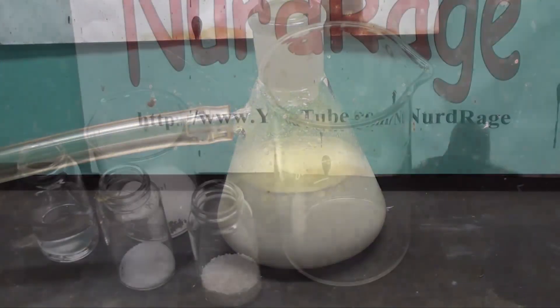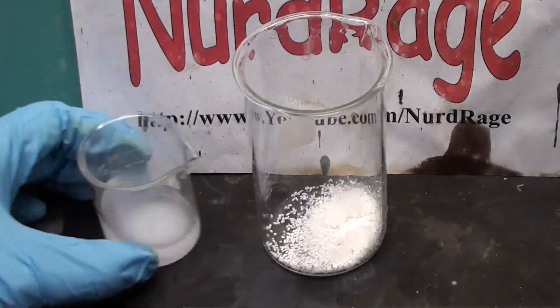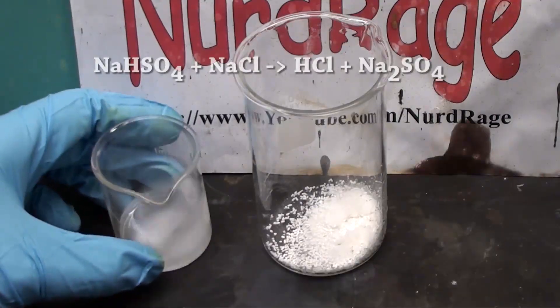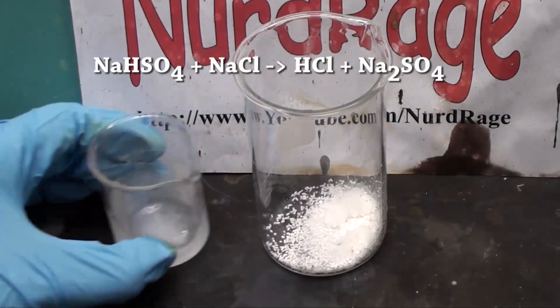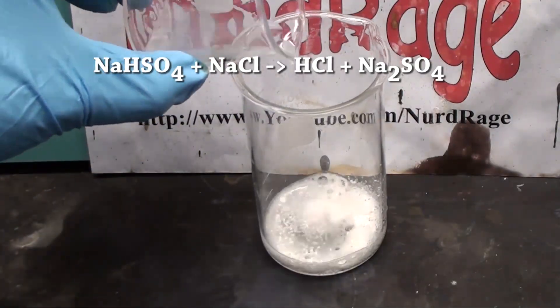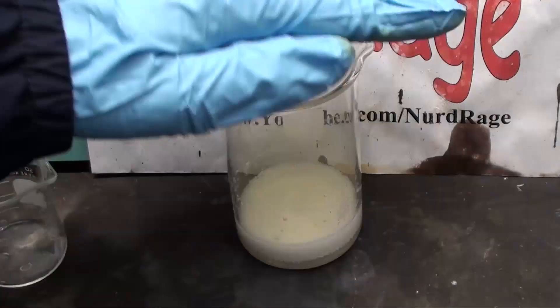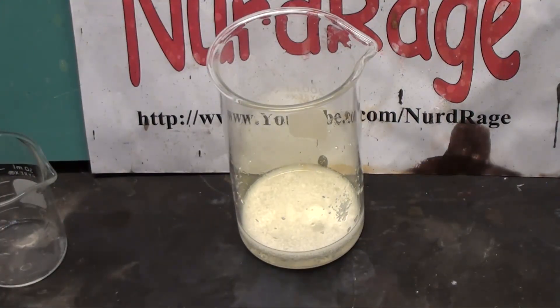Now you might not have hydrochloric acid available, but you can get around that by using sodium bisulfate and sodium chloride salt. Mixing equal amounts of both with enough water to dissolve them will produce hydrochloric acid in situ that will work to generate the chlorine gas. This is convenient if you don't want to keep too much hydrochloric acid around.